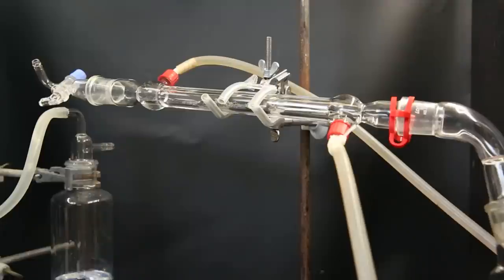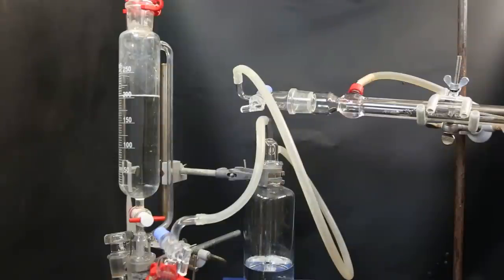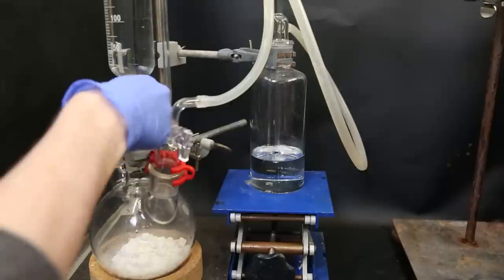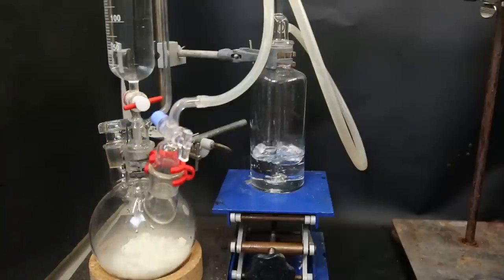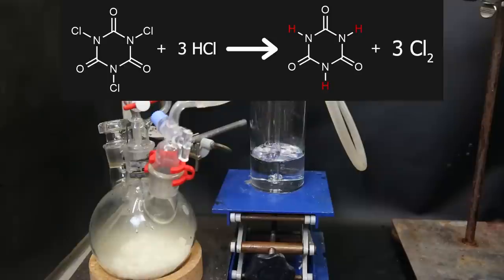When all of the arsenic has been added, I attach a gas adapter to the left side of the column. I then connect this to the other side of the gas washing bottle. Now that the setup is complete, I can start the reaction. So I stopper the dropping funnel, and then add some of the hydrochloric acid to the flask with the TCCA. In this reaction, the chlorine from hydrochloric acid and the chlorine from TCCA react to form chlorine gas. While the hydrogen will take the spot the chlorine was before, to make cyanuric acid.